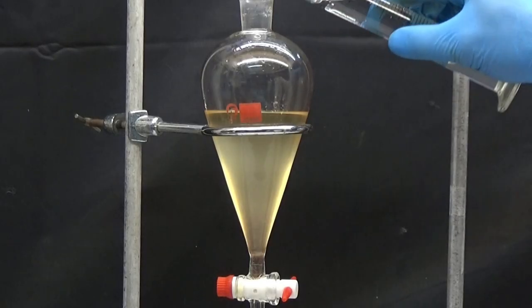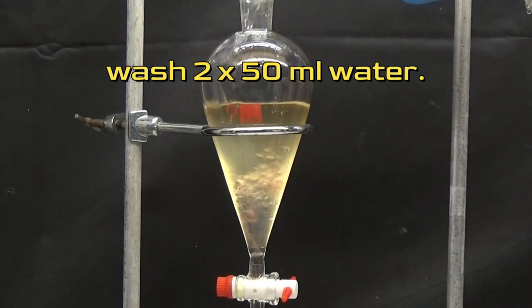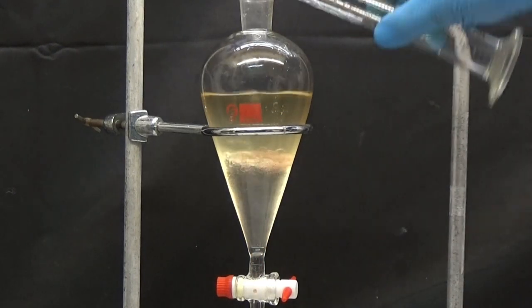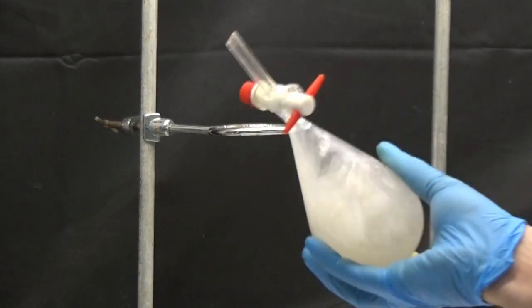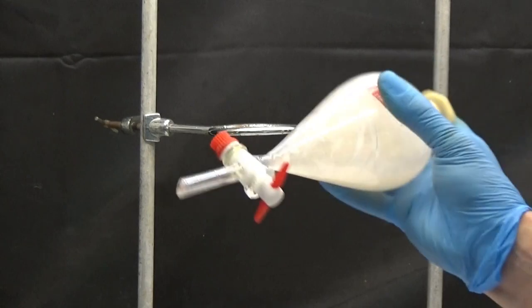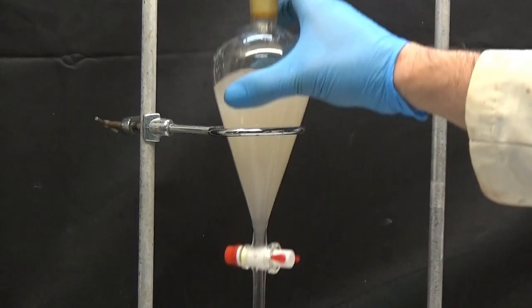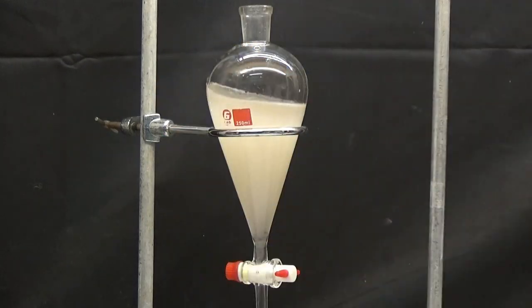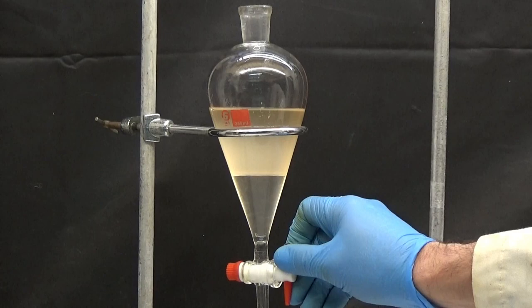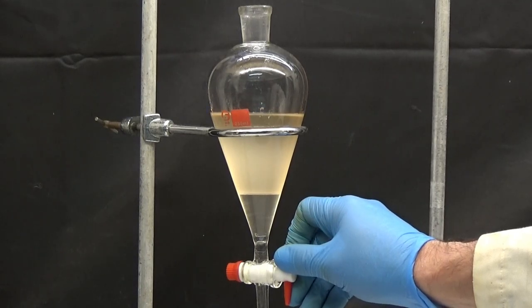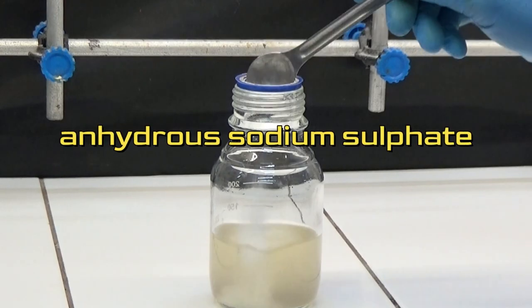Then wash twice with 50 milliliters of water. Decant and dry with enough anhydrous sodium sulfate.